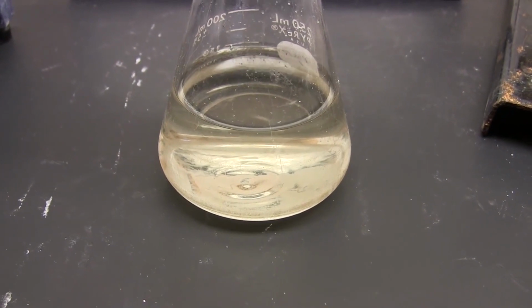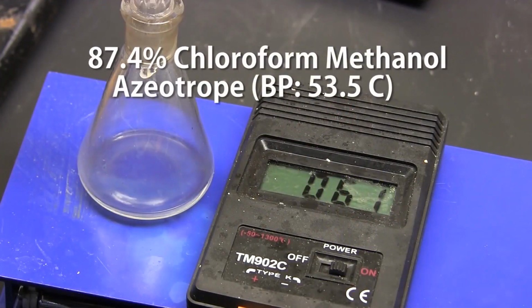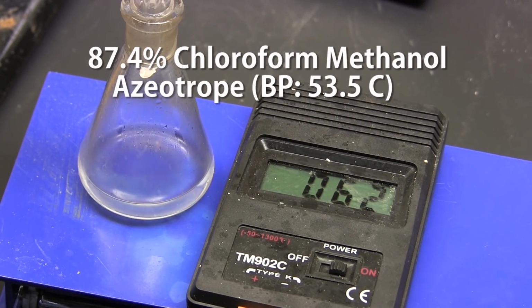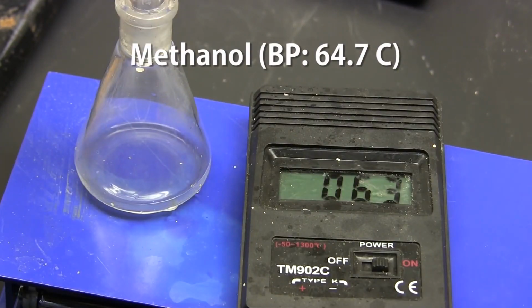To recover the small quantity of trimethyl orthoformate, we use fractional distillation. What boils off first under 60 Celsius is an azeotrope of methanol and excess chloroform. This azeotrope has a boiling point of around 53 degrees Celsius. Then we boil off the next 100 milliliters of methanol at around 64.7 degrees Celsius.